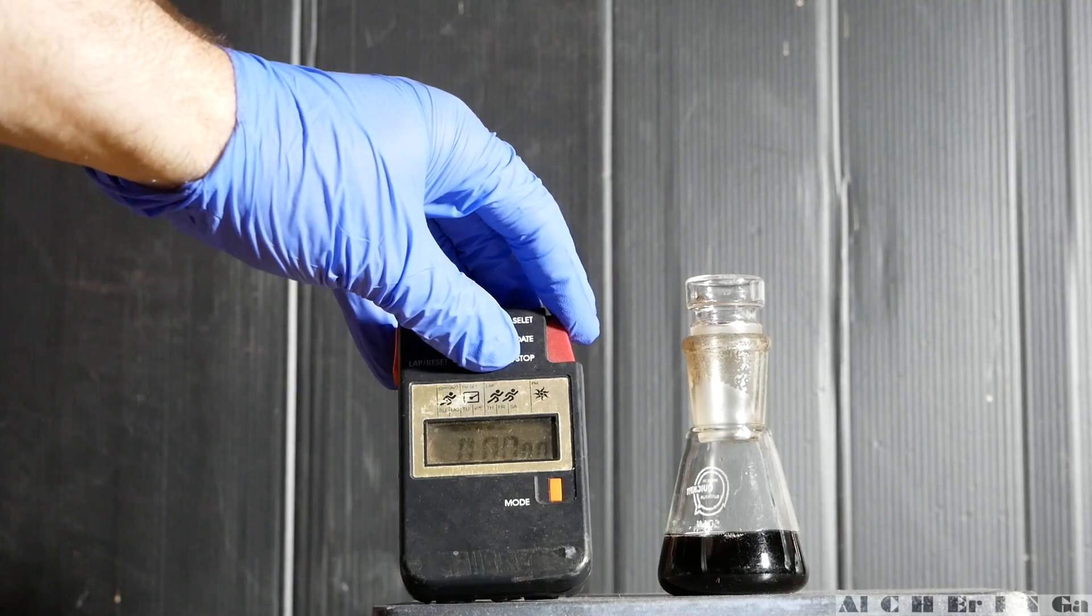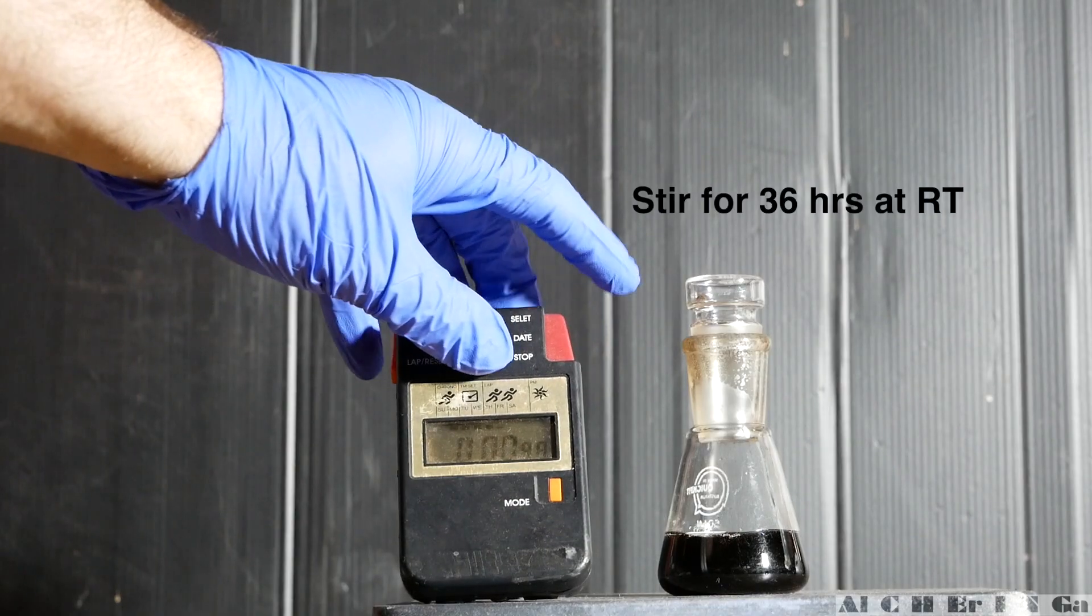Stopper the flask and stir the mixture for 36 hours at room temperature. You may wrap the flask with some aluminum foil or leave it to stir in a dark place.